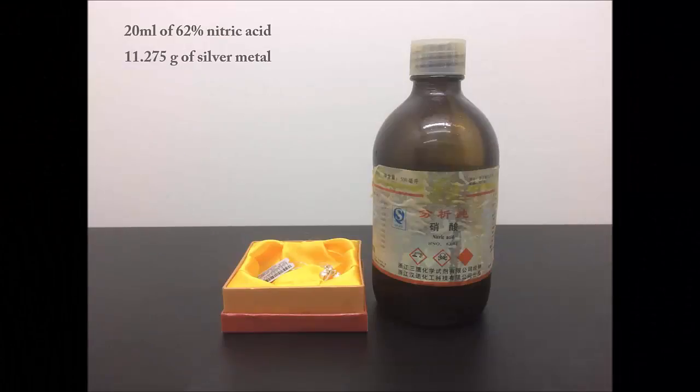To start things off, we only need two chemicals really, some pure silver metal and here I'm using 62% nitric acid. It will still work at a lower concentration, but it will take much longer to react and you'll have to evaporate all the extra water.